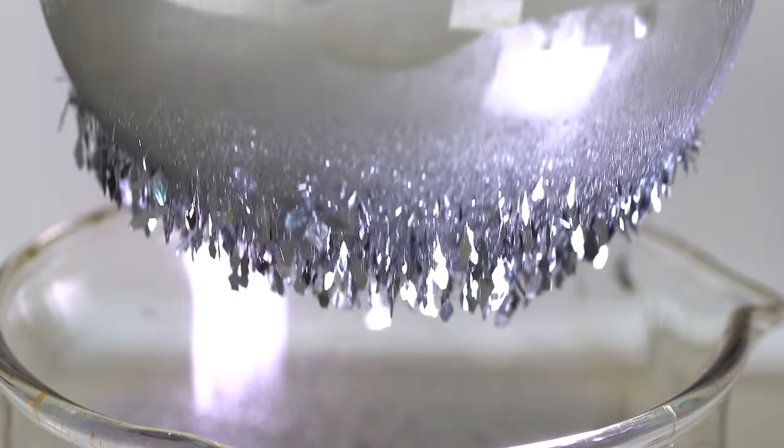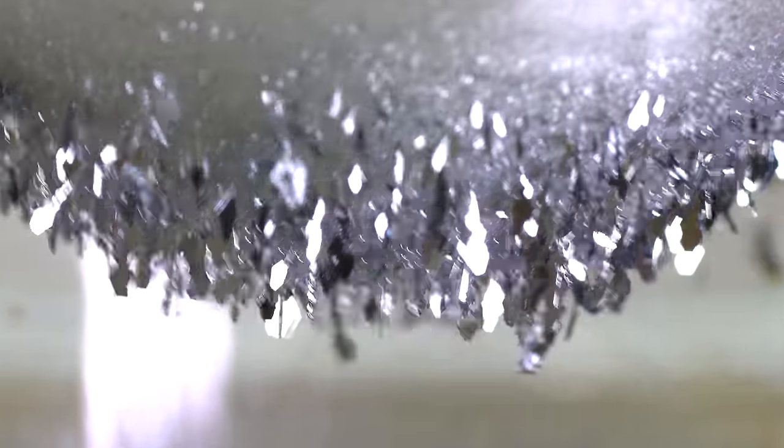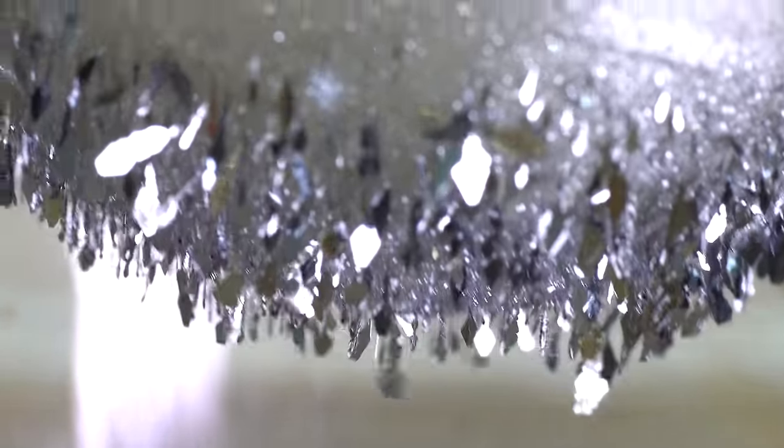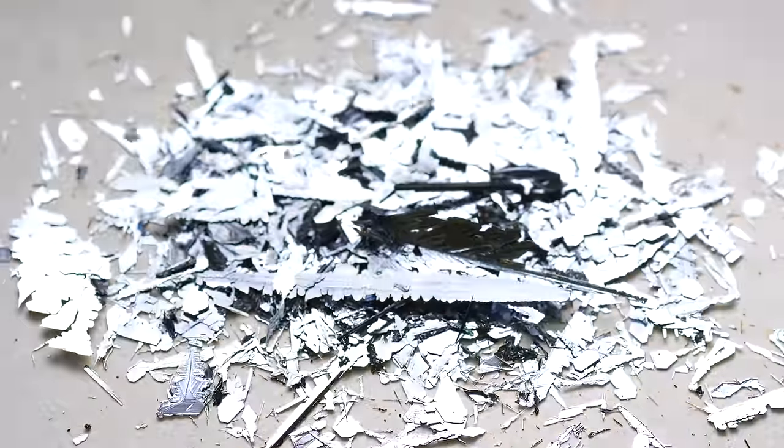I let the glass cool for about two hours. After that I decided to check on crystals. They grew three times their initial length. And now I have highly pure iodine, without any inclusions. Iodine crystals can also be used to produce liquid iodine.